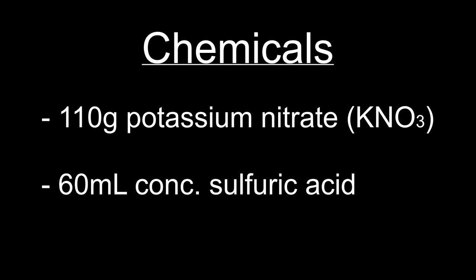For this experiment, you only need two chemicals really: 110 grams of potassium nitrate and 60 milliliters of concentrated sulfuric acid. The potassium nitrate can be swapped out for another nitrate salt such as sodium nitrate. However, you should not use ammonium nitrate because one of the products produced will be ammonia gas which can neutralize the nitric acid that you produce.